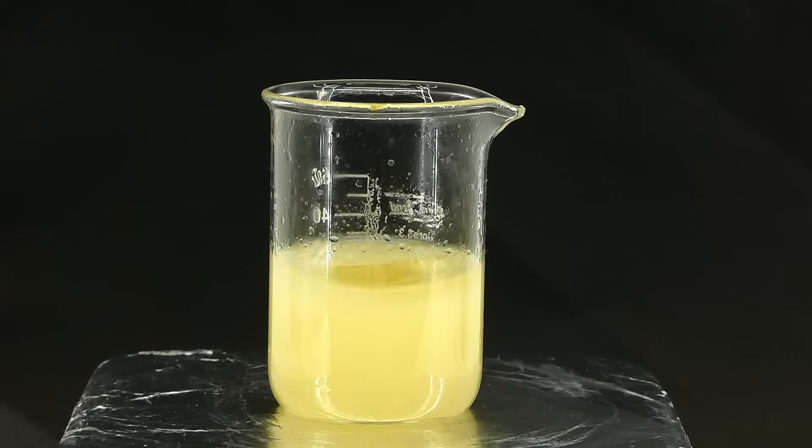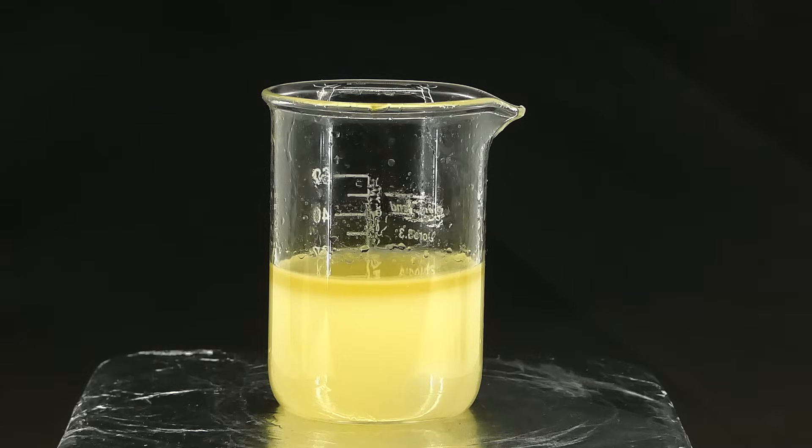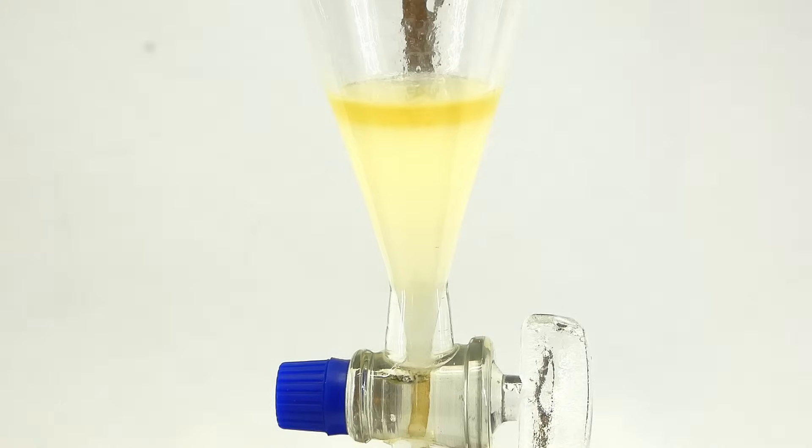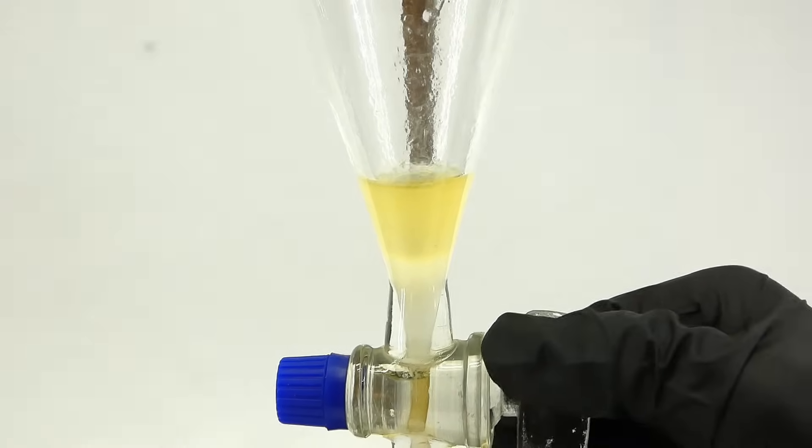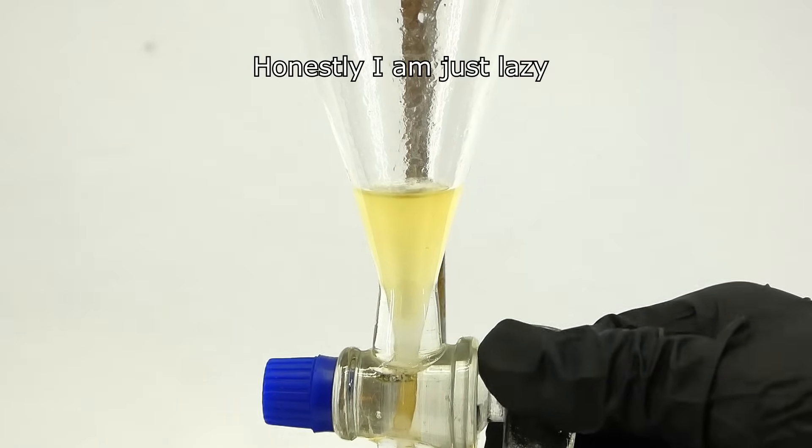Also, a random layer of oil appeared on top of the glycerin, and to get rid of it, I used a separatory funnel. Ideally, I would also now get rid of the insoluble salt, but I figured that I will do that later.